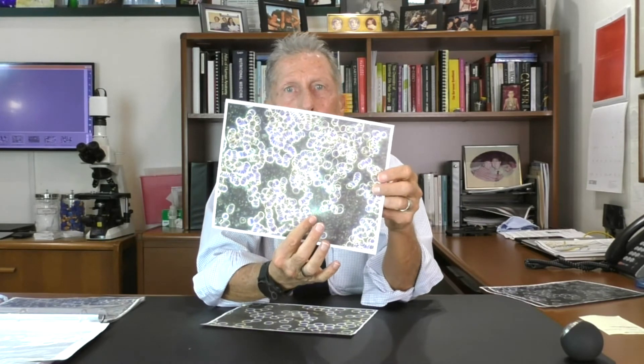And it looks like this — now this is a mess. A normal blood slide looks like this: these are red blood cells, they carry oxygen from your lungs to your tissues, they're nicely separated, not overlapped, and the field in between is all clear. This is her slide — you can see all these cells are glommed up, her circulation is going to be poor. She has all these white patches, which are called biofilms — collections of inflammatory proteins.